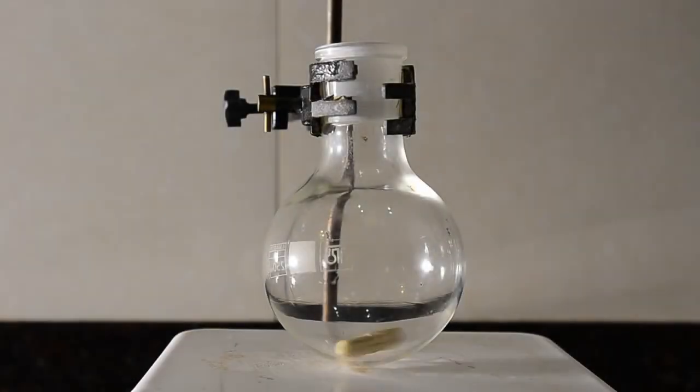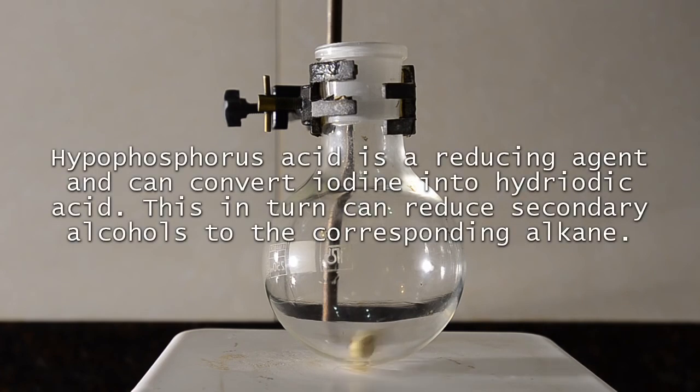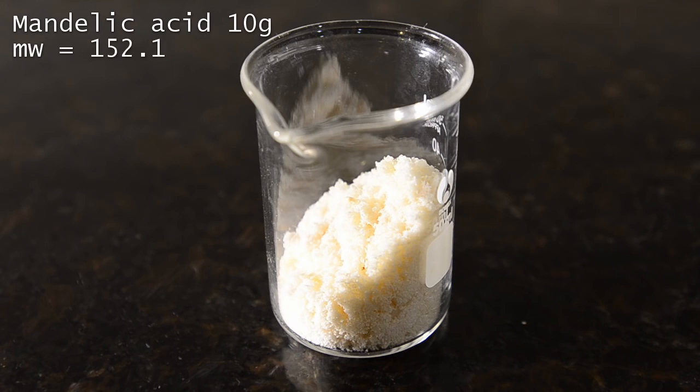Today we're going to take the product from our previous video, hypophosphorous acid, and use it together with iodine to reduce a secondary alcohol. The mechanism of this reaction is complex, but hydriodic acid is produced as an intermediate and this is the active species. The secondary alcohol we're going to use is mandelic acid, also prepared in one of our previous videos.